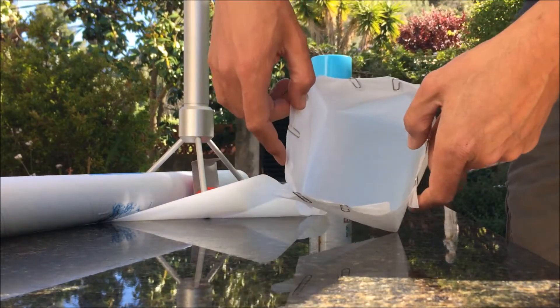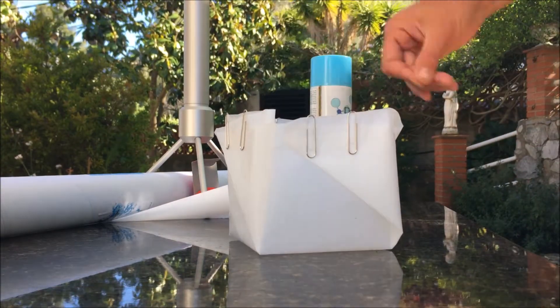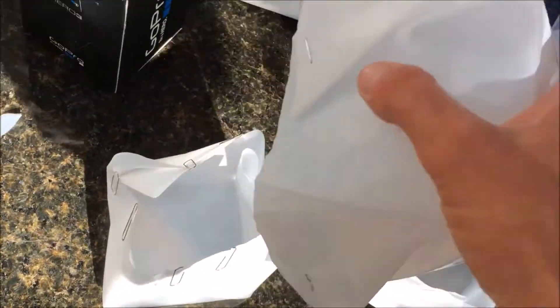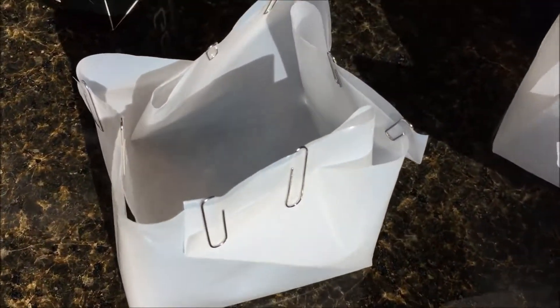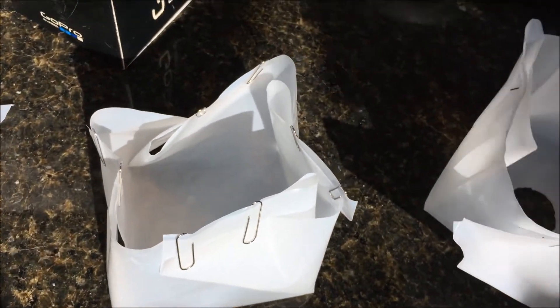This can already serve as a little vessel in which you catch the extraction liquid. If you want to be even more hygienic and avoid condensation getting into the extraction liquid, you will need to make two or three of these boxes. One has a hole cut in the bottom, and another one without a hole. The original one I made uses paper clips, while the other ones are stapled. Paper clips are convenient because when you're ready you can just open up the foil easily.